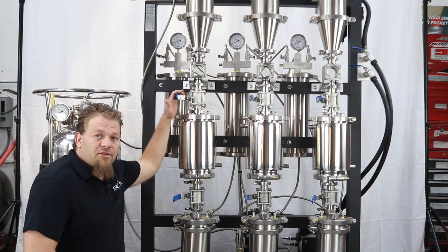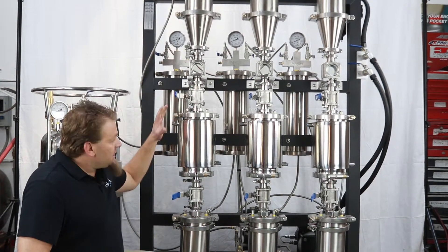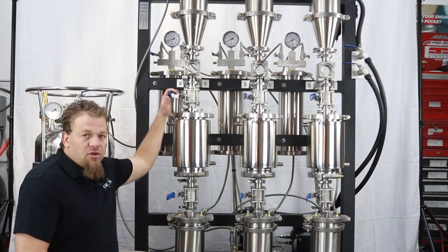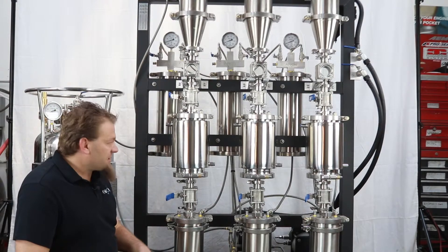I'm CK with Anion Extraction Systems and today we're going to be showing you our dewax column. The dewax column comes standard with the Trifecta and Minifecta systems, so it's not some additional upgrade you have to pay for — it comes incorporated right in with the system itself.